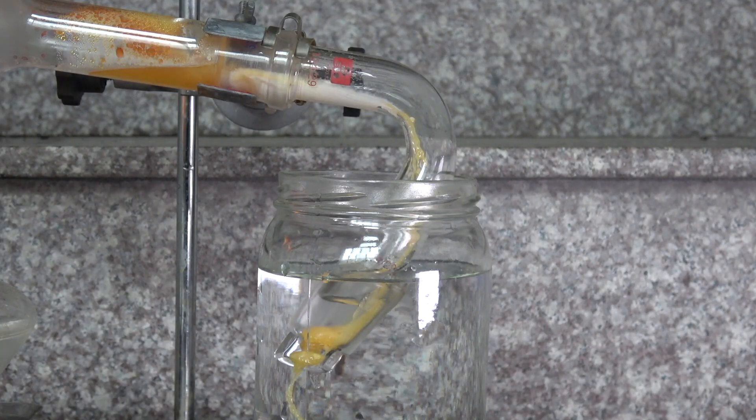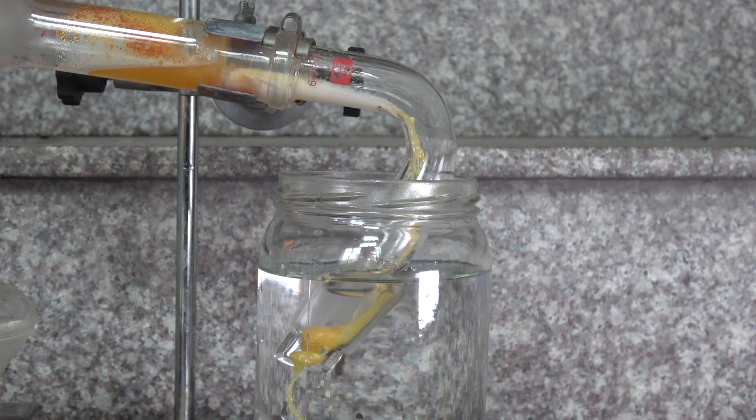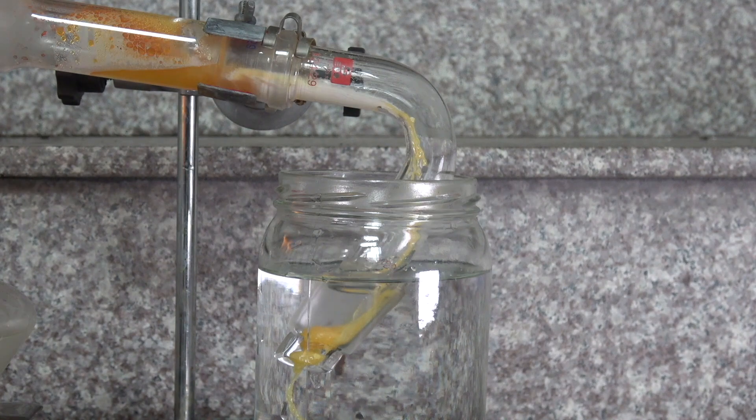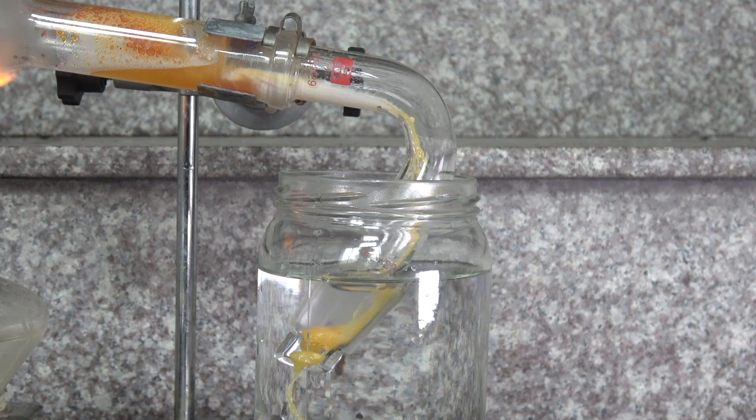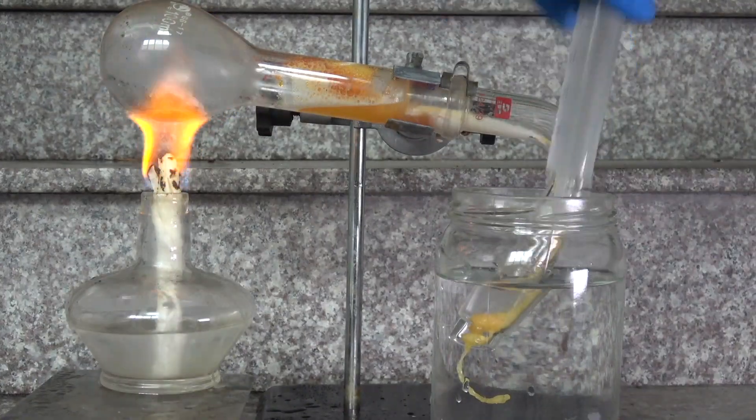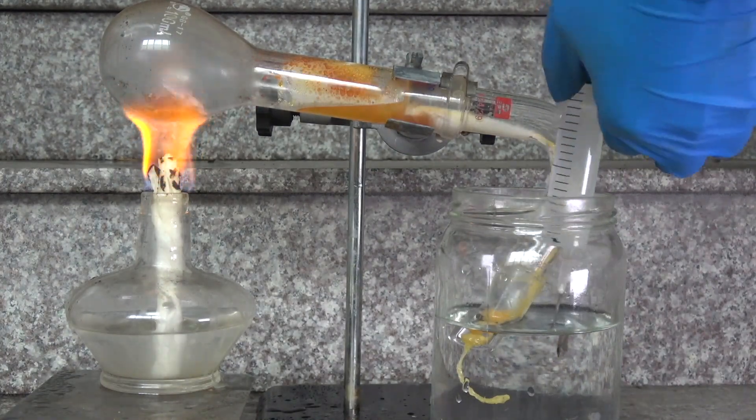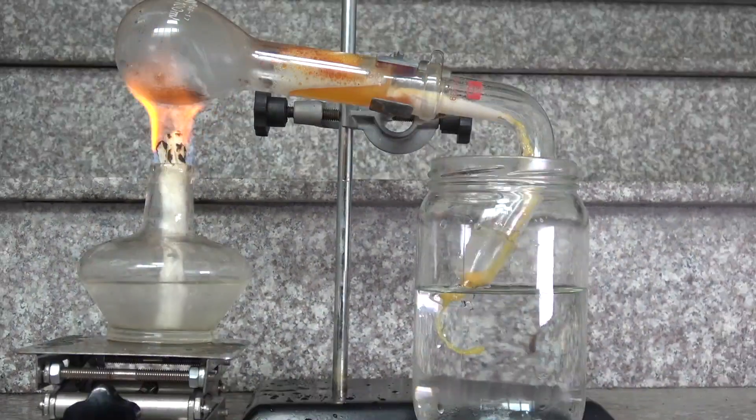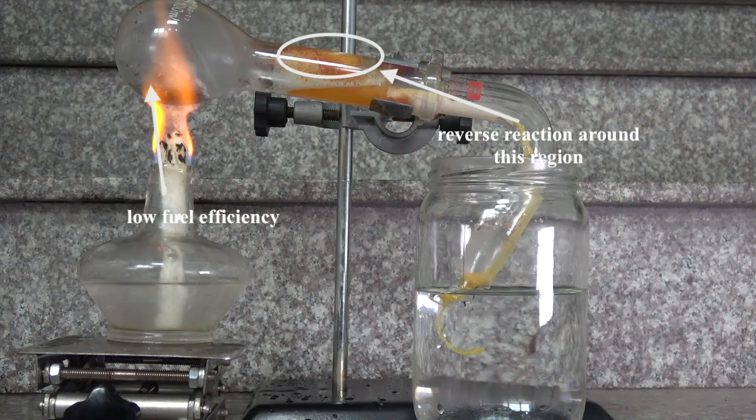Another thing to pay close attention to while deploying this setup is the water level in the receiving beaker relative to the position of the end of the distillation adapter. And this much water shown in the clip is way too much. Well, the good thing was that I realized this could be very problematic and removed the excess water before anything catastrophic happened. And I will explain why just in a second. This reaction took an hour to complete. And despite the good results, I still believe there's a lot of room for improvement.